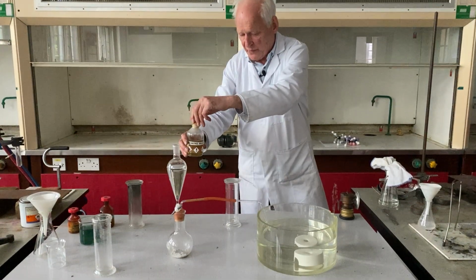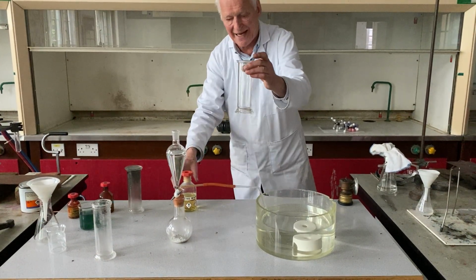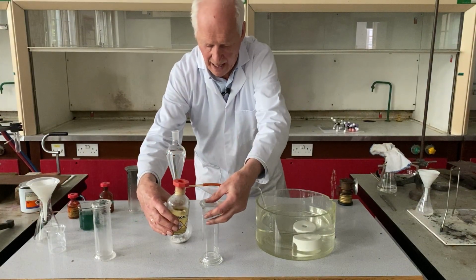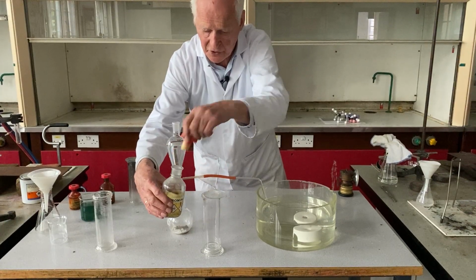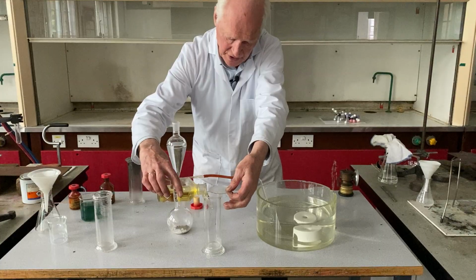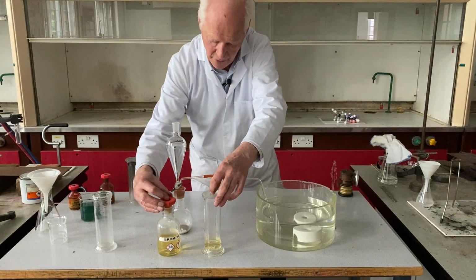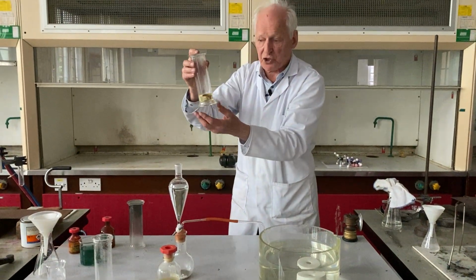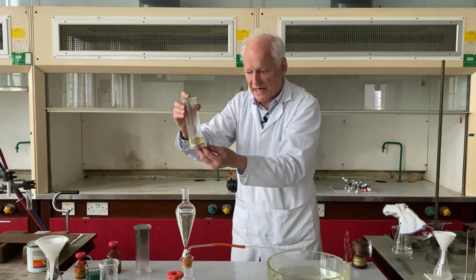So I am now going to pour a small quantity of bromine water into my acetylene here. I'll do it over here. Hopefully I will be able to do this without allowing too much bromine to escape. I'm going to open this. As I said, this is very dilute, and I'm pouring in that much there. Now, what I'm going to do now is to shake this up very vigorously, hoping to show you that the bromine is decolorized by this extremely reactive gas.